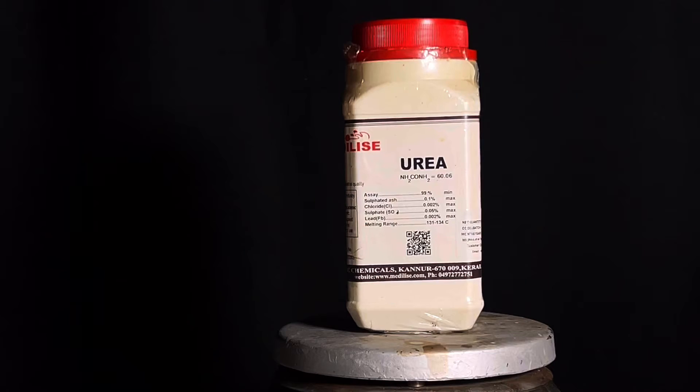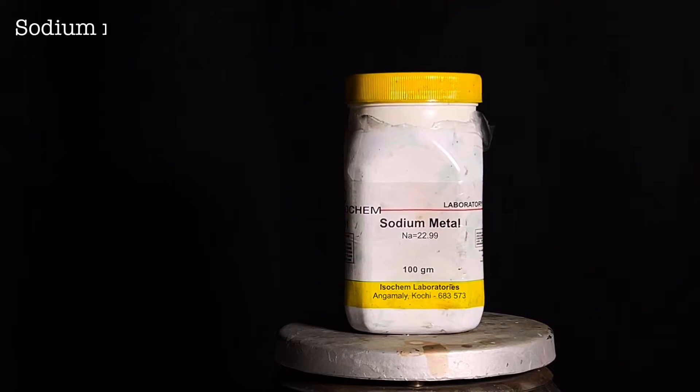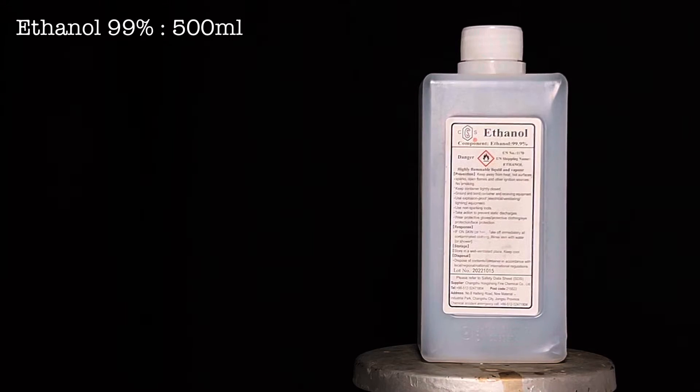For this synthesis, we need 30 grams of urea, which should be perfectly dry for the reaction to take place, 80 grams of diethyl malonate, 11.5 grams of sodium metal cleaned from impurities, 500 milliliters of absolute ethanol pre-dried using molecular sieves, and about 45 milliliters of concentrated 37% hydrochloric acid.